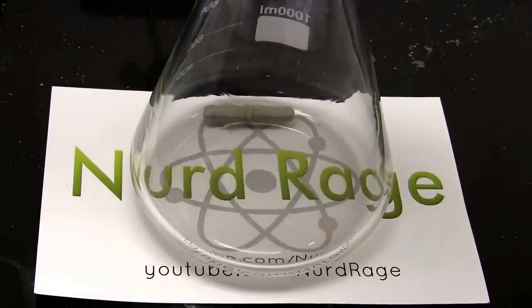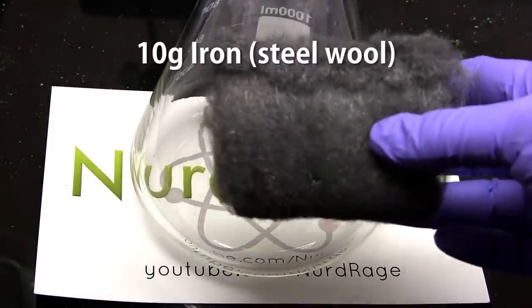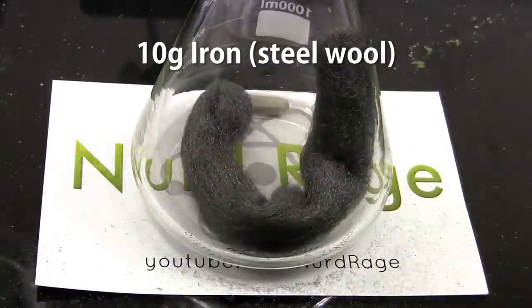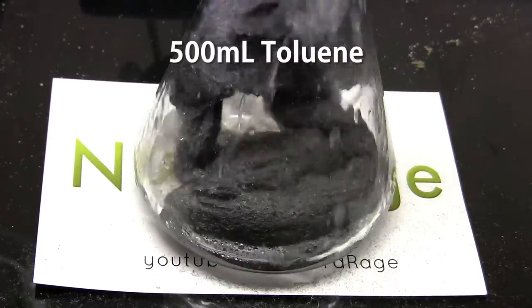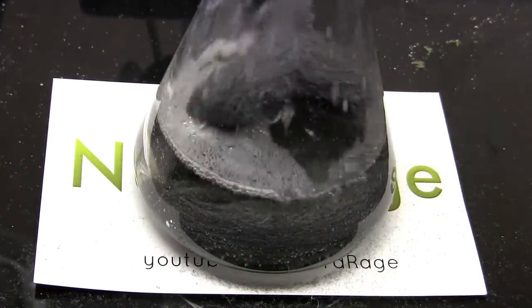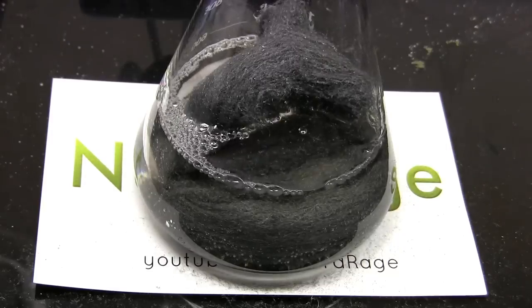First we get a liter sized flask and add some fine steel wool. I'm using a 10g roll but the exact quantity is not critical. Now we add 500mL of toluene. This is sold as a paint thinner solvent. I had to acquire mine by fractionally distilling some lacquer thinner.